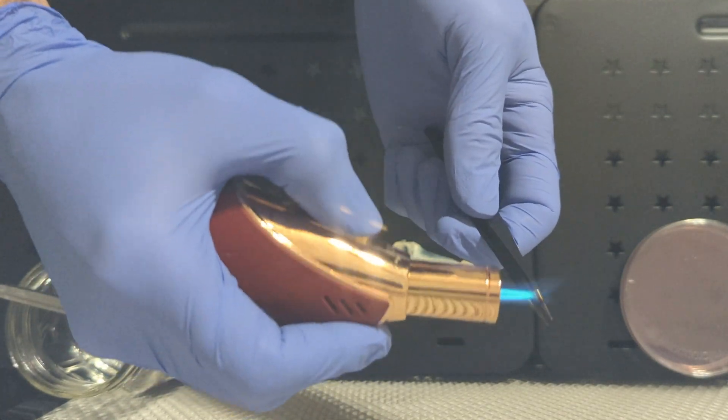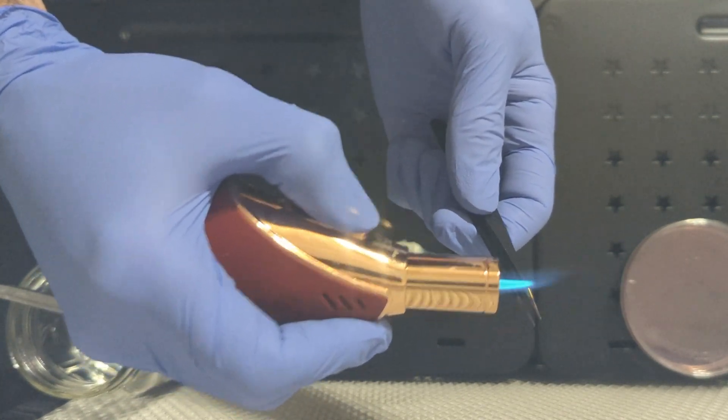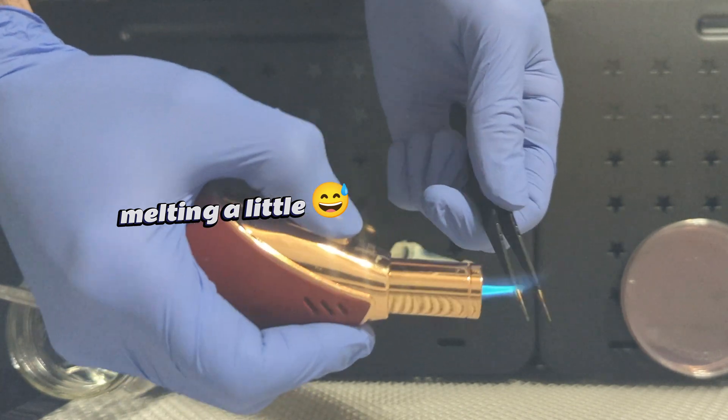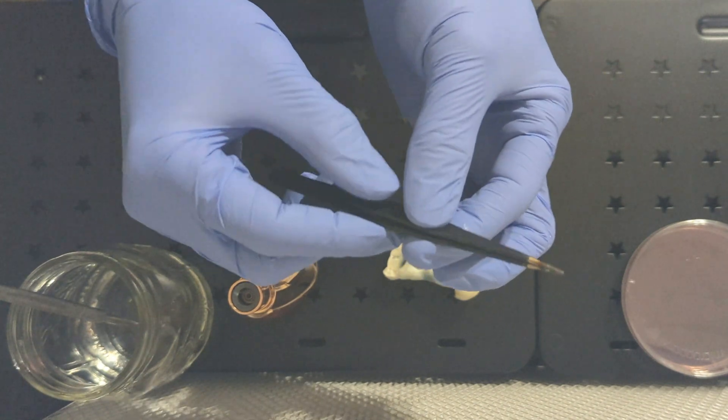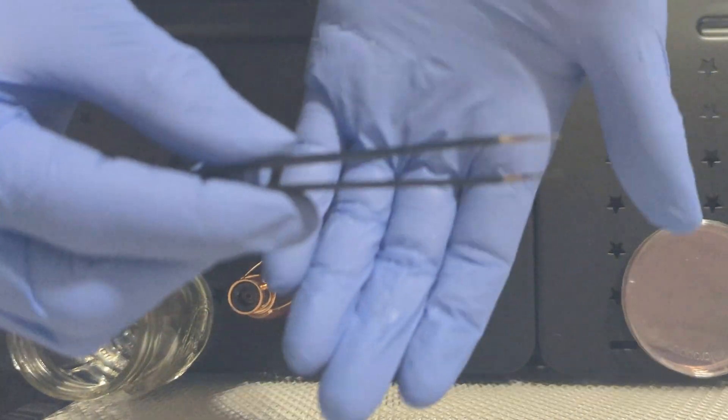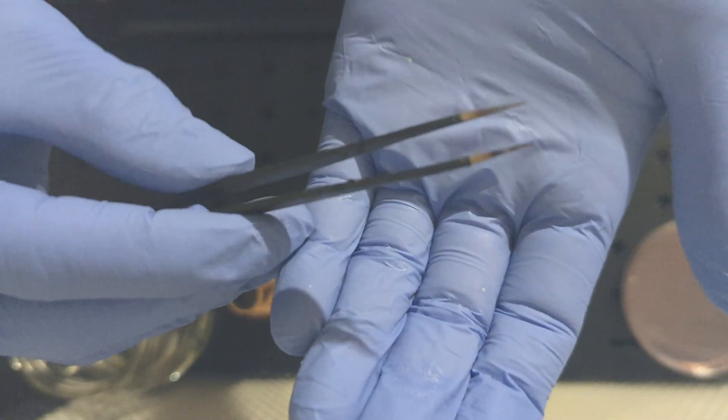To sterilize them with the butane lighter, you just heat the tips up until they turn a glowing red color. Once it's flame sterilized, you want to make sure it cools off enough that it won't kill the mycelium that you're trying to clone.